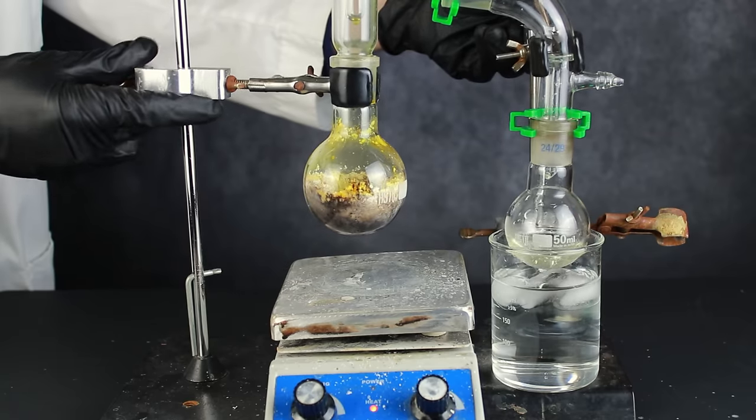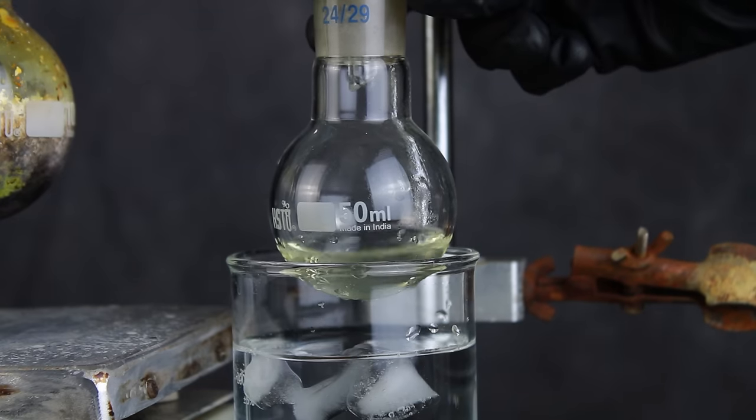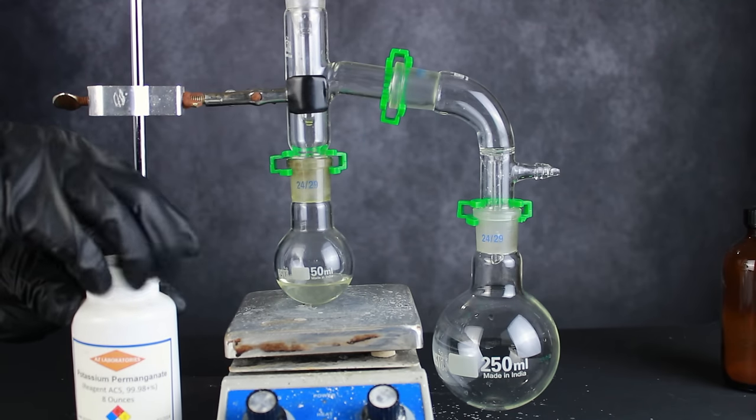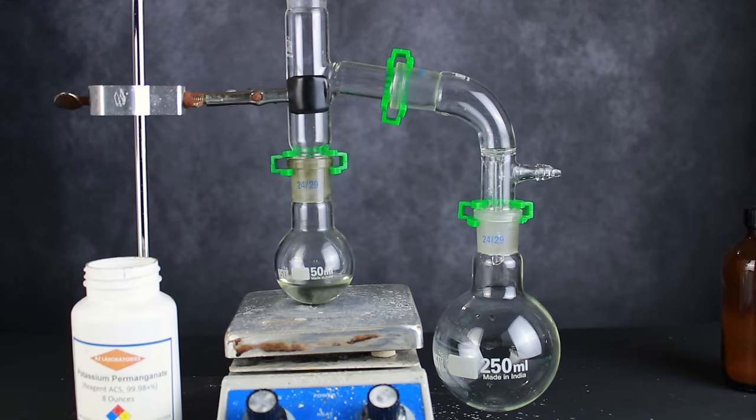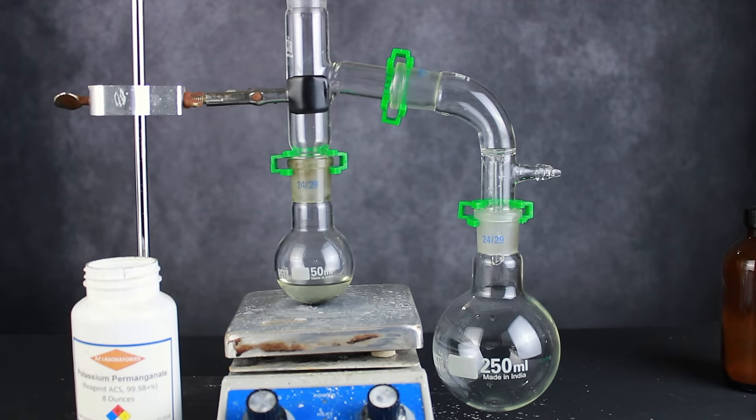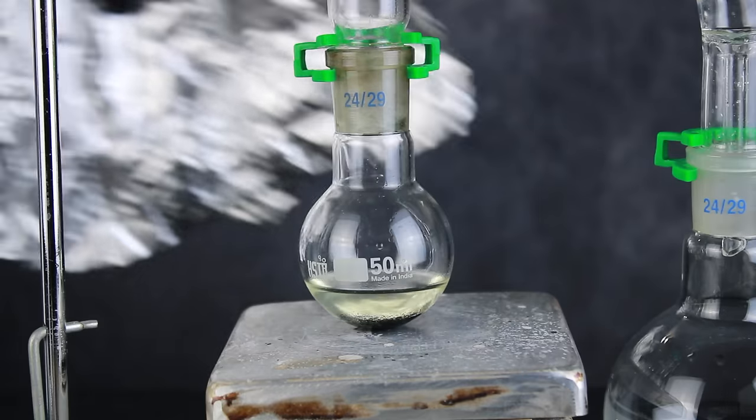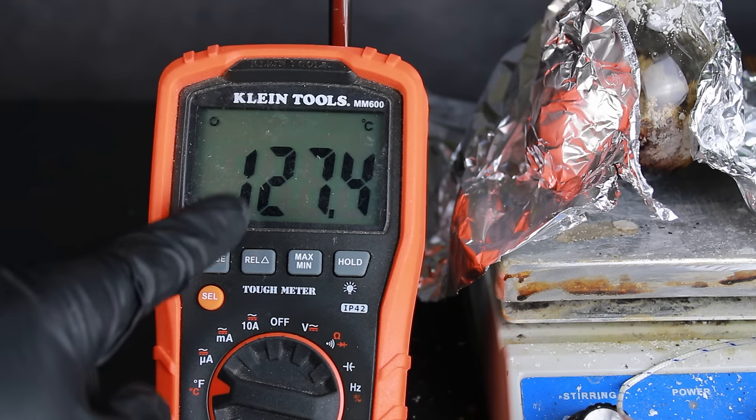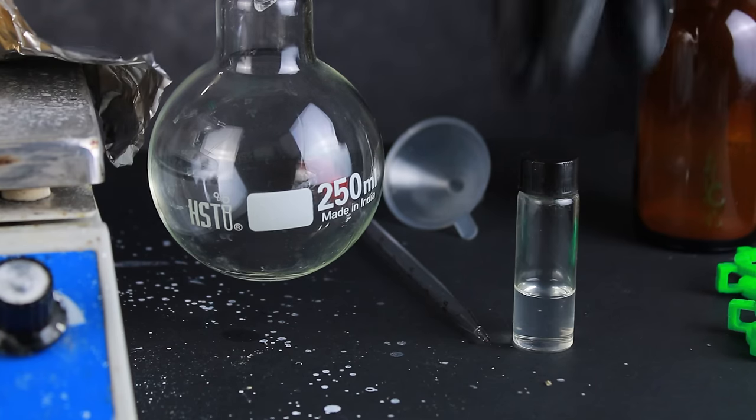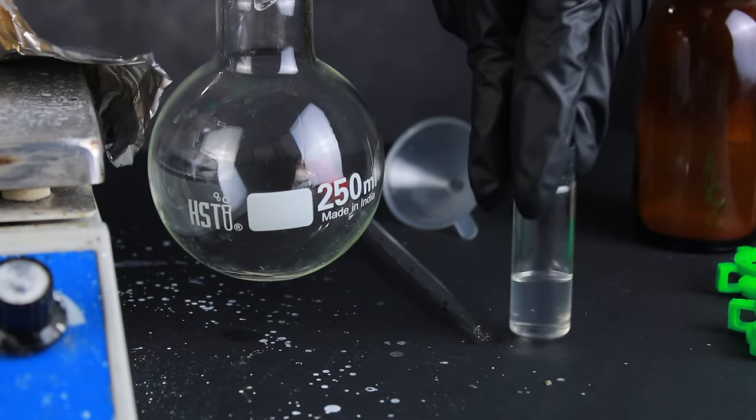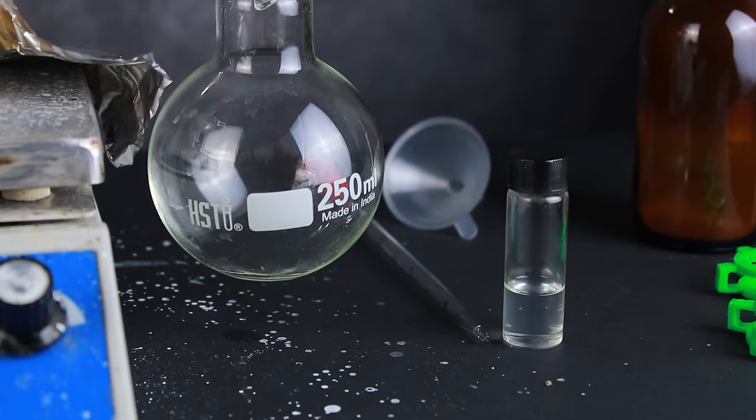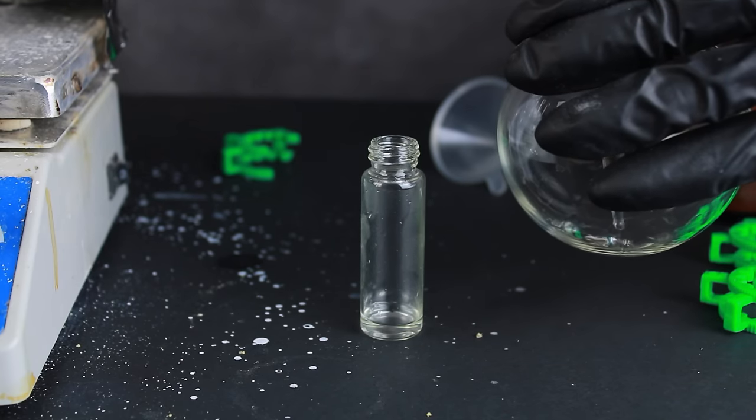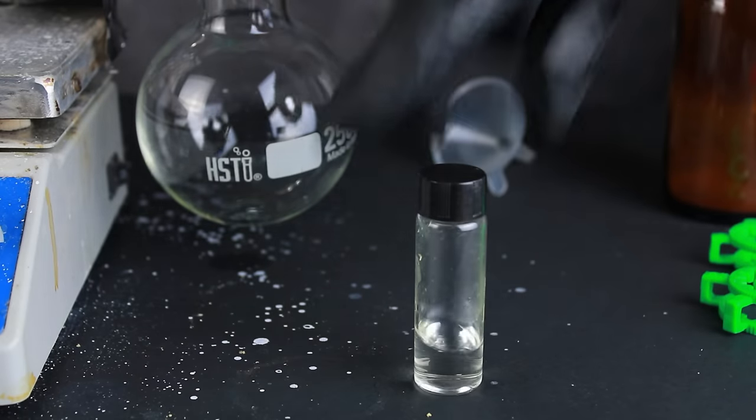But the end product still smelled acrid and garlicky from the organosulfur compounds tainting it. So to clean it up, I set up another simple distillation, and added a small spoonful of potassium permanganate to the acetic anhydride to destroy the sulfurous contaminants. This time, I made sure to isolate the separate fractions during the distillation. The fraction that came over below 130 degrees contained most of the remaining organosulfur compounds, along with other contaminants like acetic acid. The higher boiling fraction, on the other hand, held most of the acetic anhydride, and if you try this synthesis yourself, this is the fraction you want to keep.